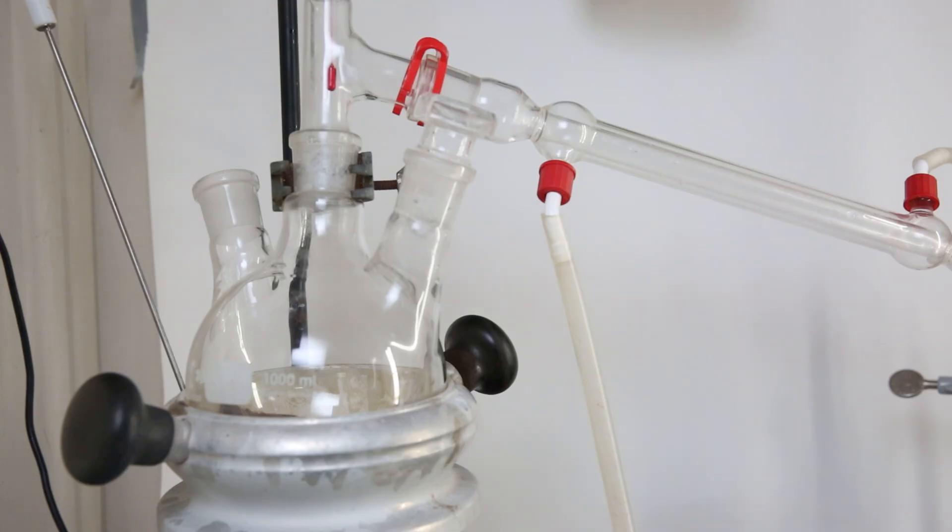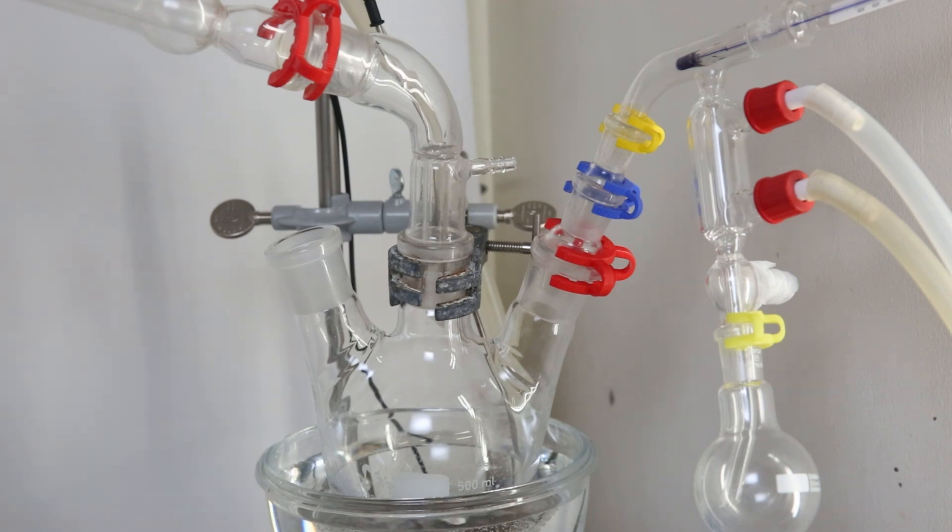The reaction will take place in a double distillation setup. Because the reaction takes place above 200C, it will boil over a large variety of impurities. So all the Acrolein and the impurities will get condensed and reach the receiving flask. This receiving flask is then also heated, to only boil off the Acrolein, which will then go through the short path distillation apparatus, condense and collect in the second receiving flask.